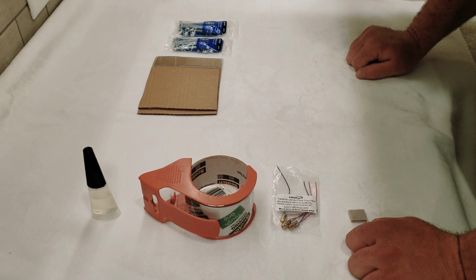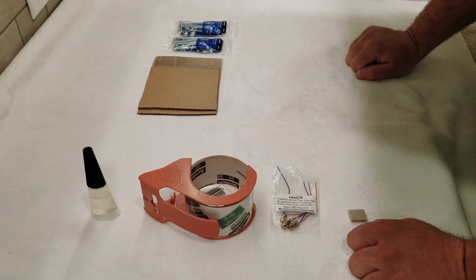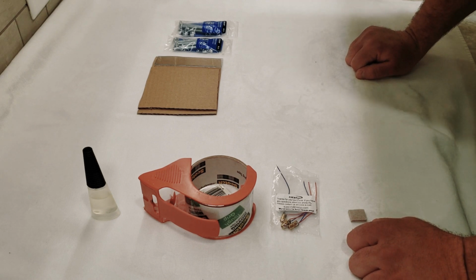Today's project is going to be a pretty simple one that can be put together with just a few items laying around your house and maybe one or two things that you have to pick up from the store or order online. But it's going to be a pretty fun one with a lot of application. So just to jump right in, what we're going to be working on today is a simple microscope, essentially a lens that can be attached to any smartphone and turn it into a microscope with somewhere around 200 times magnification.